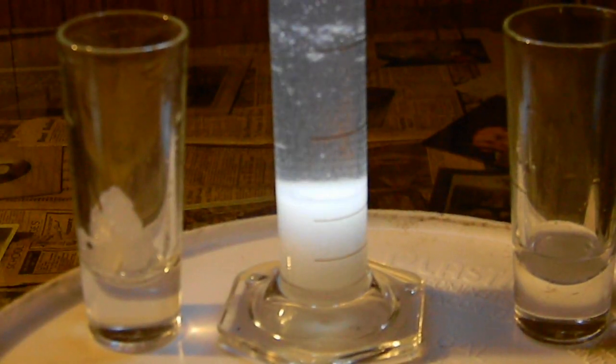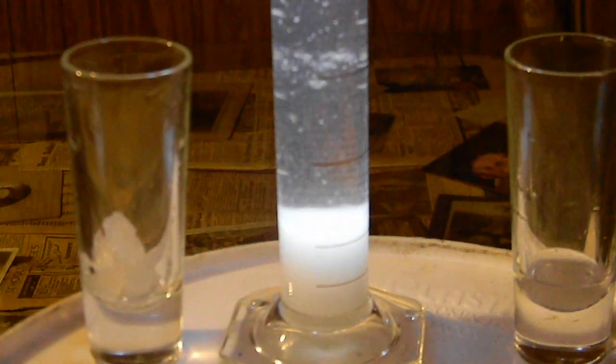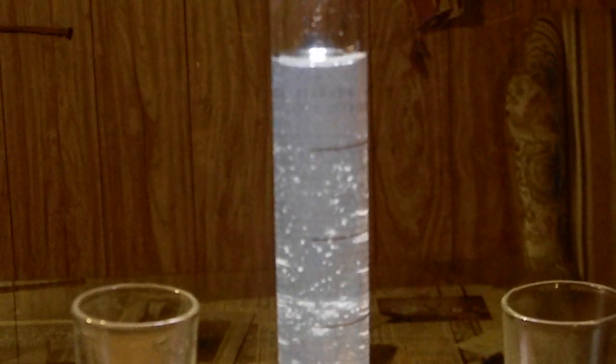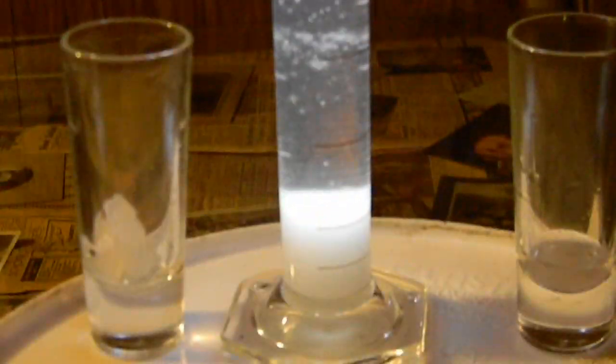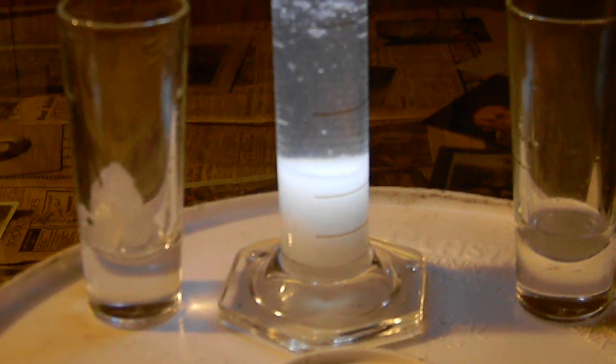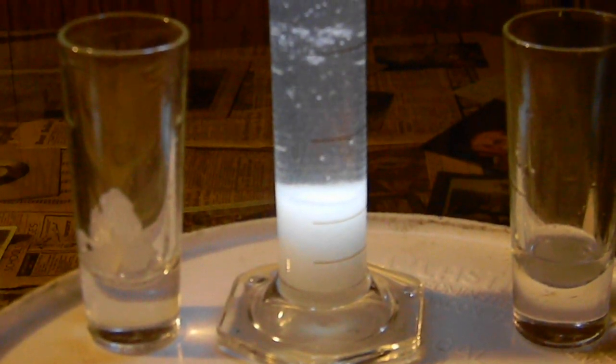This is one more way to make your potassium chlorate for fireworks or whatever. You can also do this double decomposition using the sodium with a lot of other metal salt solutions. You don't ever want to get this stuff anywhere near ammonium chloride because it will make a salt called ammonium chlorate, which can go off simply by sunlight touching it, a change in temperature, and it can explode without needing to be mixed with anything. So don't ever get the chlorate salts anywhere near ammonia or ammonium salts.